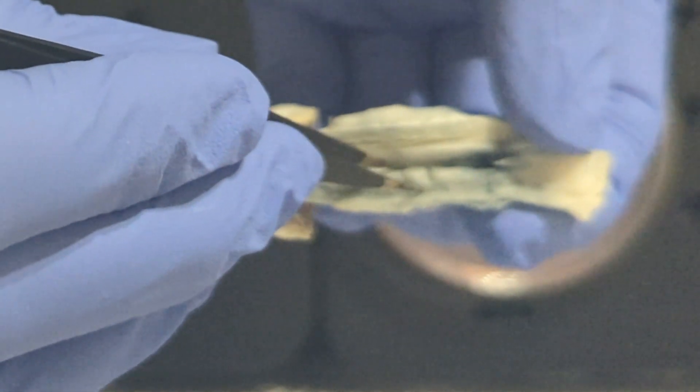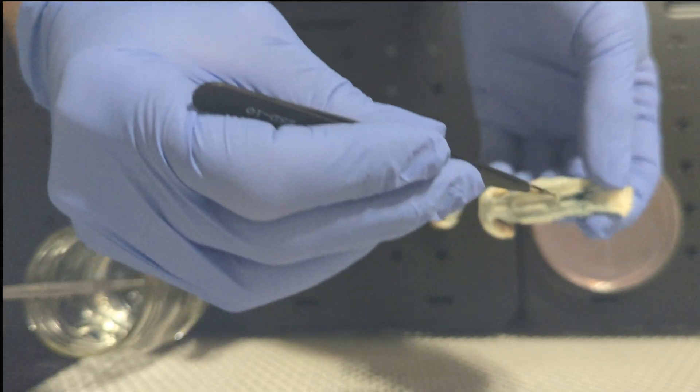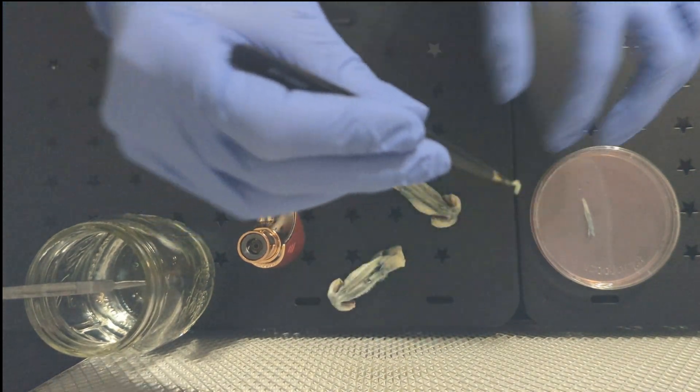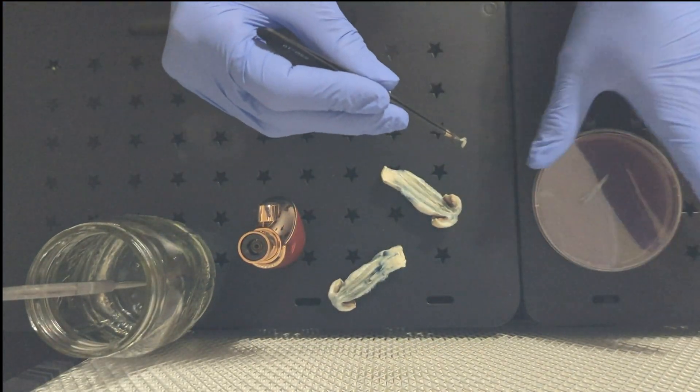When you clone a mushroom, you are essentially restarting a mono culture instead of many different cultures. If you cloned it correctly and there's no contamination, you will have basically one expression that for the most part should make even pin sets and fruiting a lot more even, and the fruits should all be similar versus sporadic with multi-spore.